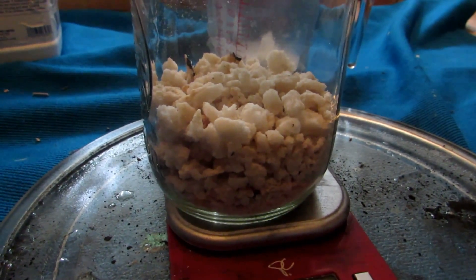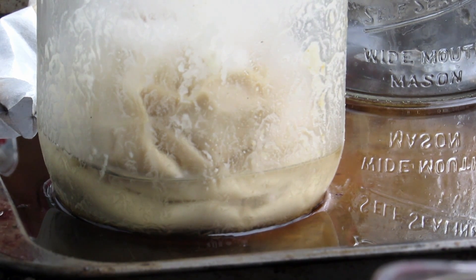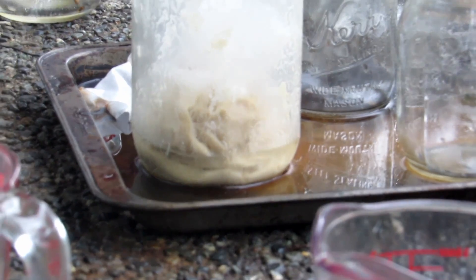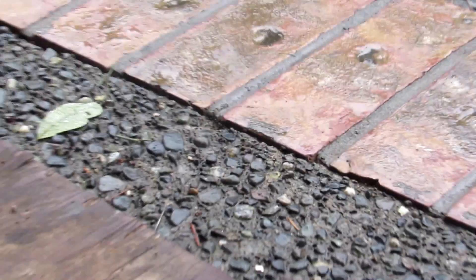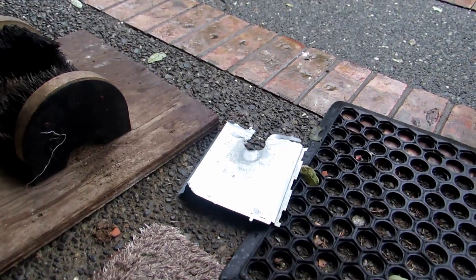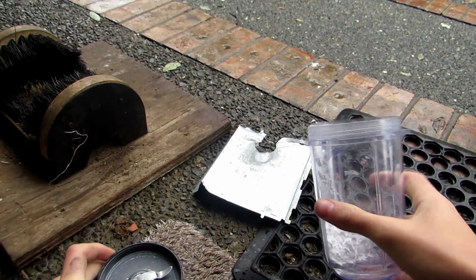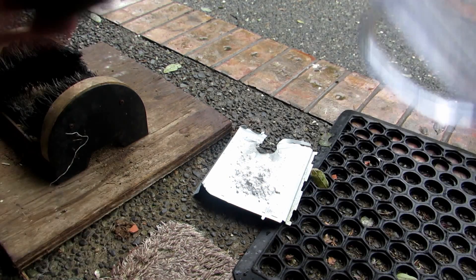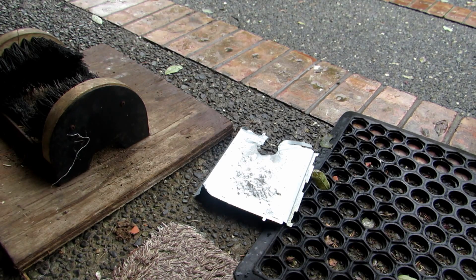Most of our lost product was likely left in the immense amount of filter papers used — they're all in this jar, and there's still a layer of liquid at the bottom with reasonable amounts of sodium nitrate I may recover later. To test reactivity, I mixed six grams of our sodium nitrate with six grams of sugar, ground it up nice and fine, and poured it onto a piece of metal. Let's light it with a blowtorch and see what happens — we should get a bright orange flame and some vigorous burning.